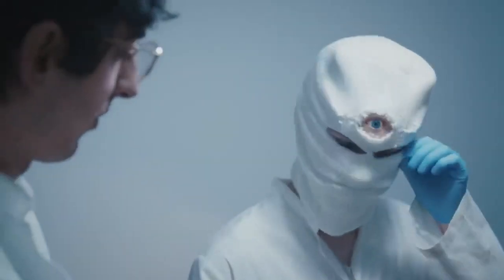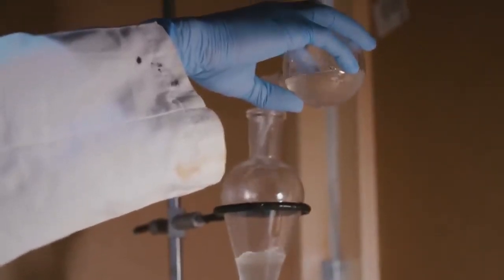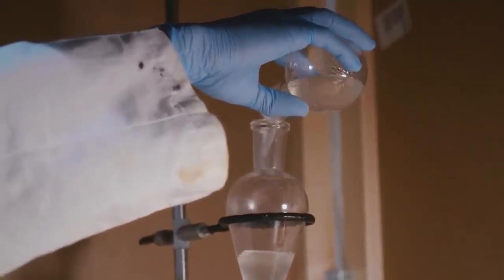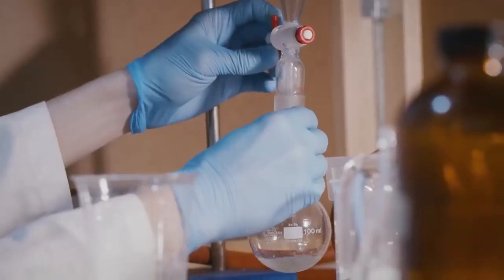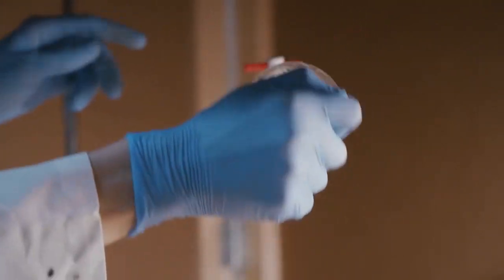So this has reacted for the last 12 hours or so. The reaction is done, but the DMT still has to be extracted from the reaction mixture using pH manipulations analogous to the ones that were used to isolate DMT from mimosa hostilis. Half of the chemistry is cleaning up the mess you make to get that crystal product.